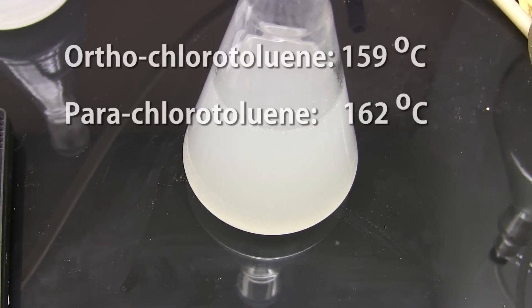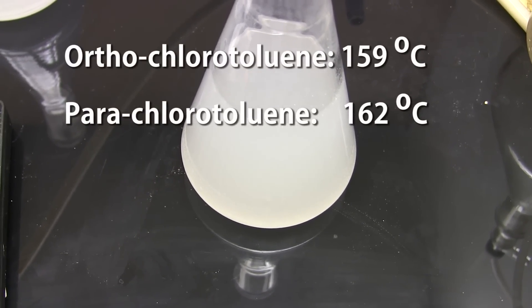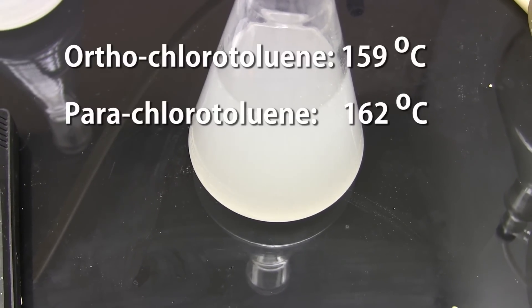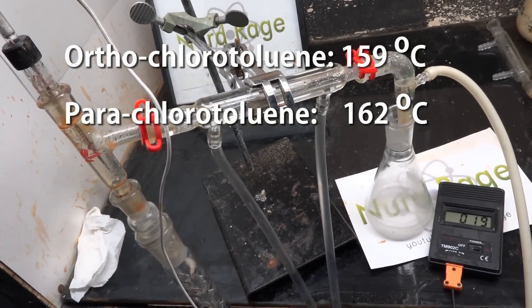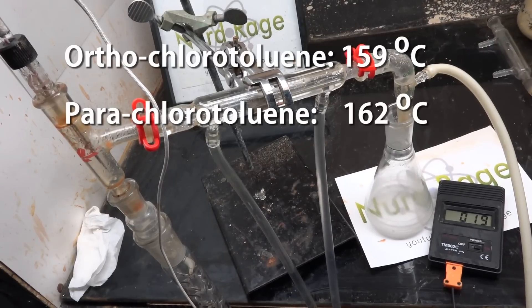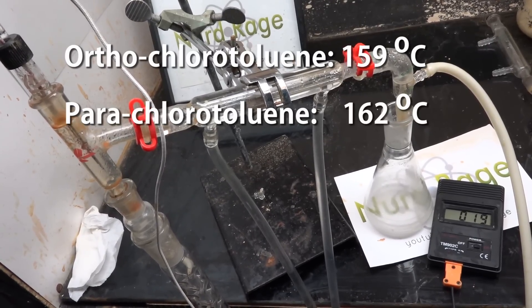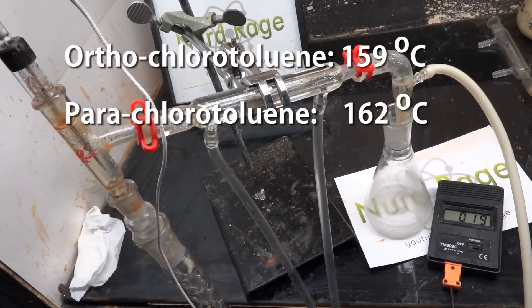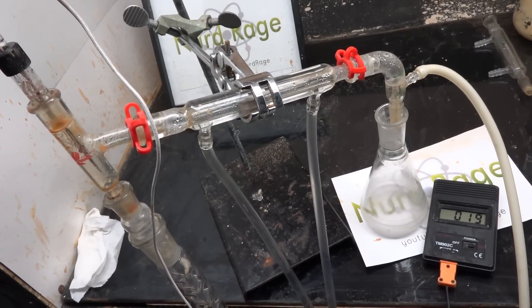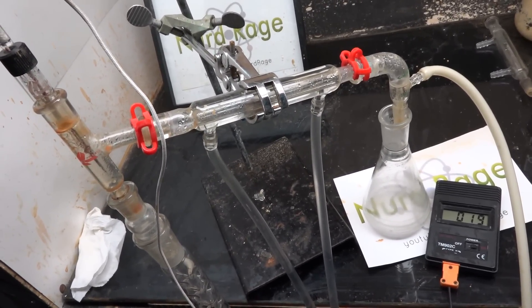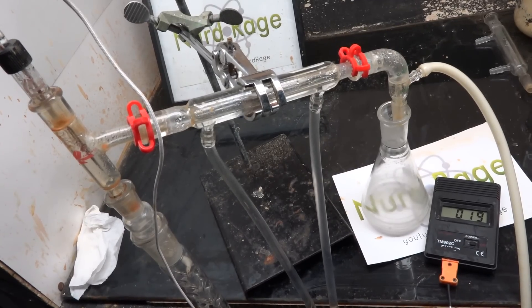Now ortho and para chlorotoluene have slightly different boiling points and so they can be separated industrially by fractional distillation. Unfortunately the overlap of their vapors is so great that you need a huge column of 200 theoretical plates or more. One of the patents I read called for a column 13 meters long. Yeah, my puny little Vigreux column is not going to cut it. We're going to have to use a chemical approach rather than physical.